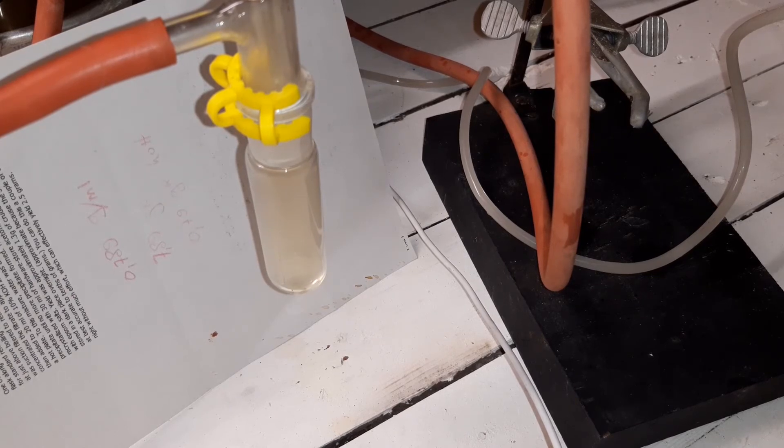As you can see, we're collecting the nitric acid. There's a slight discoloration—it's probably some water vapor as well, since the starting materials weren't perfectly dry.